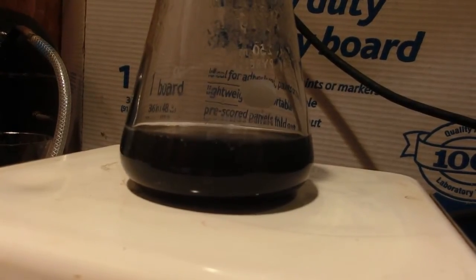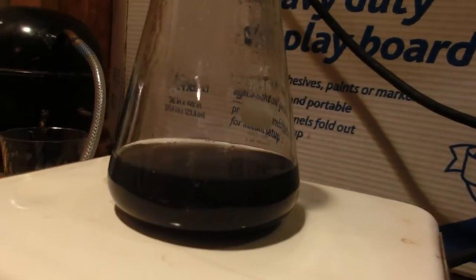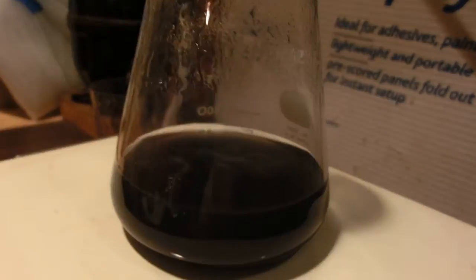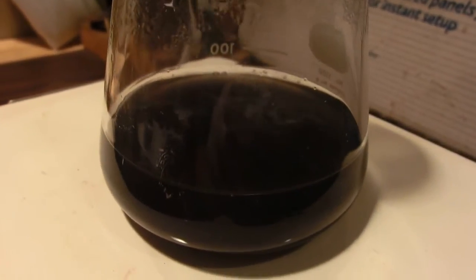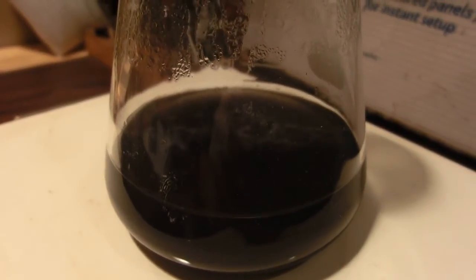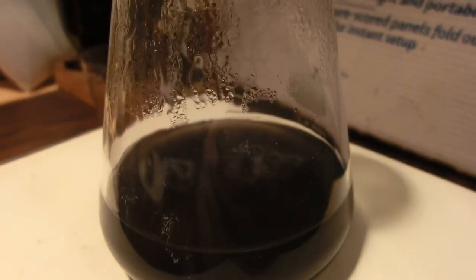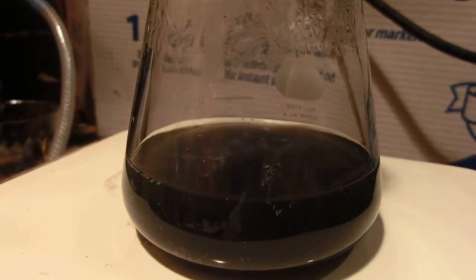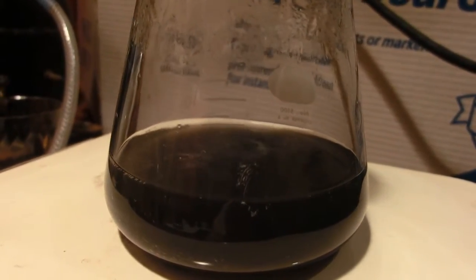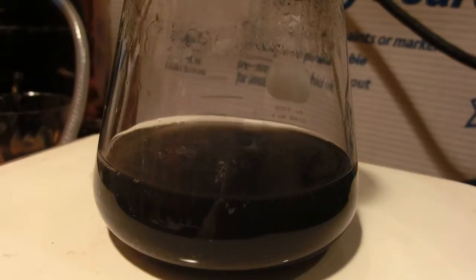It's been about 15 minutes since this has been brought to a boil and you can see the reaction has subsided drastically. There's just a little bit of bubbling going on. I'm going to let this react for maybe another 30 minutes just to make sure that all of the lead has been consumed.